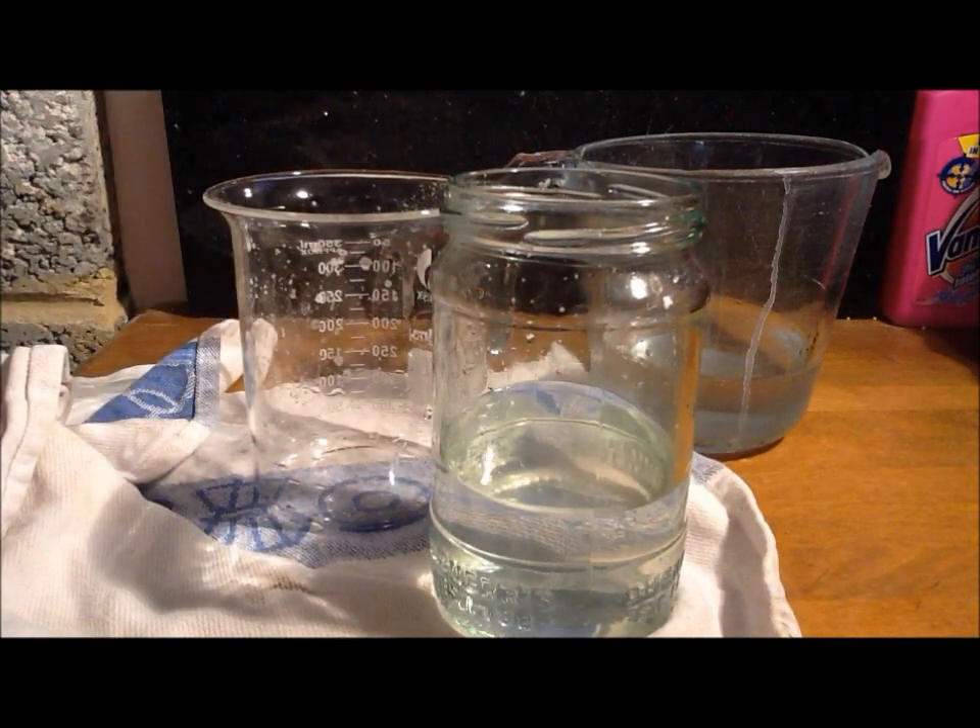You've just got to leave the solution in the freezer to cool, and we'll see what happens later. It's been in here for about two hours now, so let's have a look at the crystals. Already you can see a good build-up of needle-like crystals. But I'm going to leave them in here overnight to fully crystallise out.